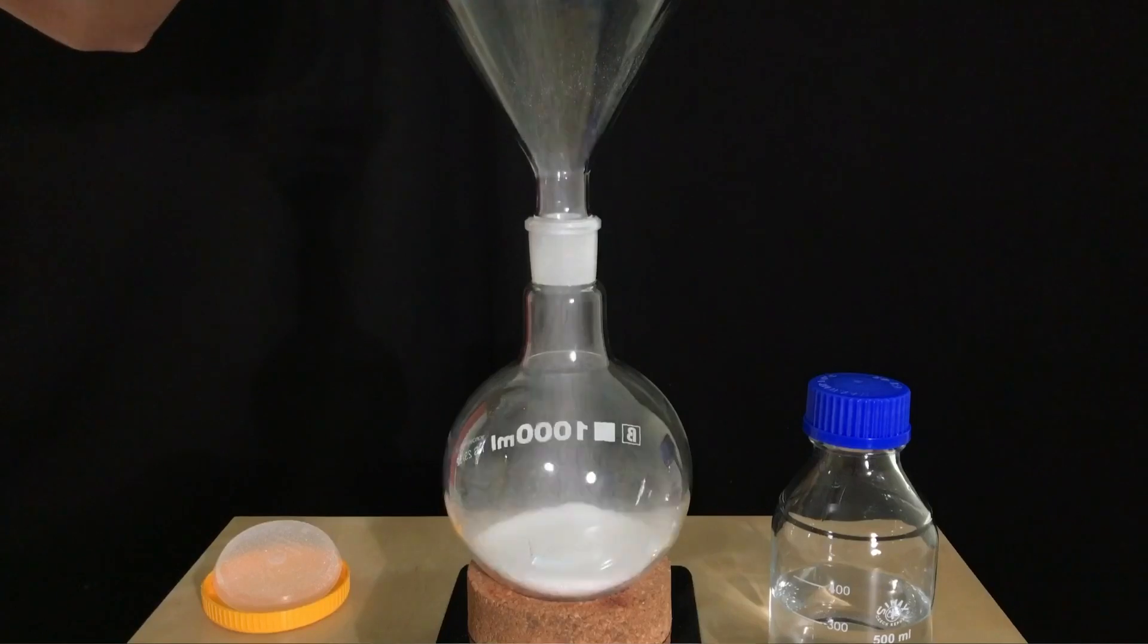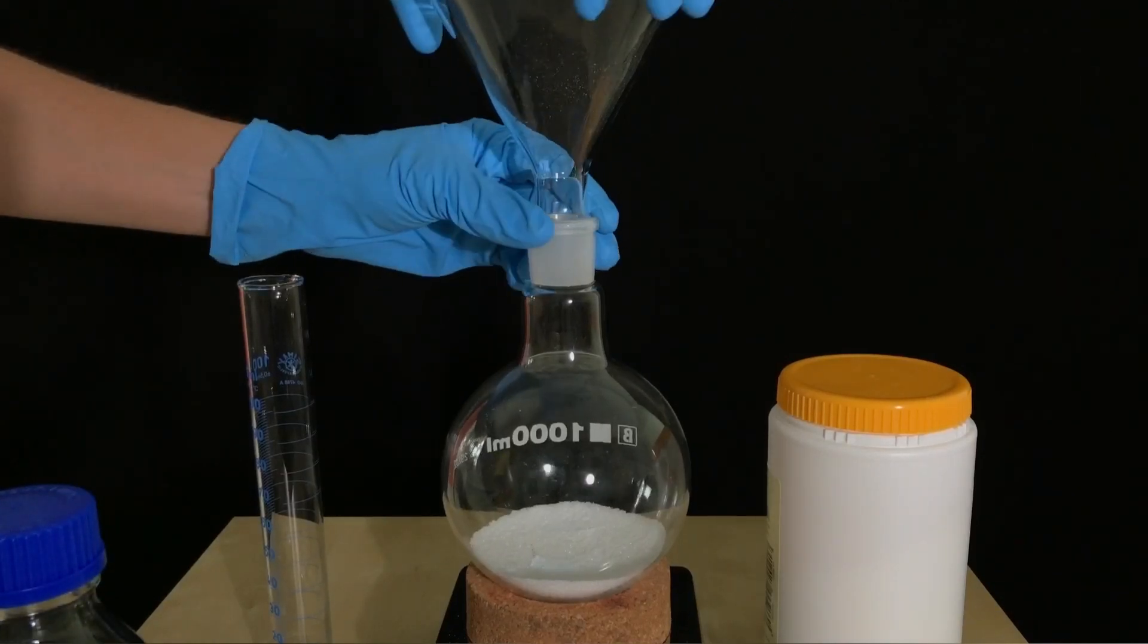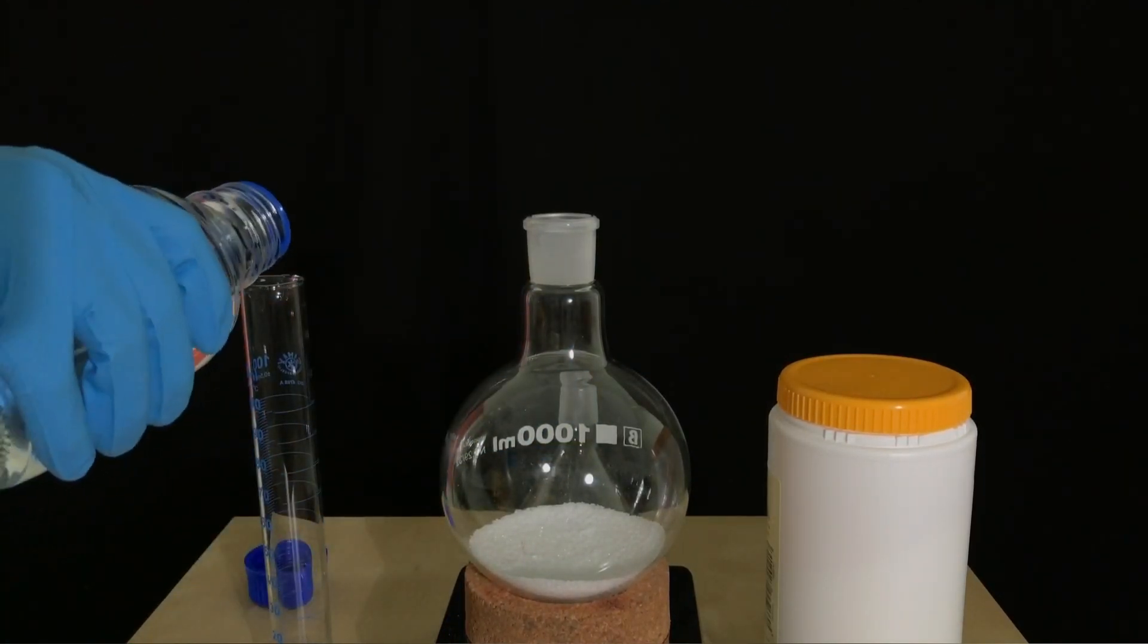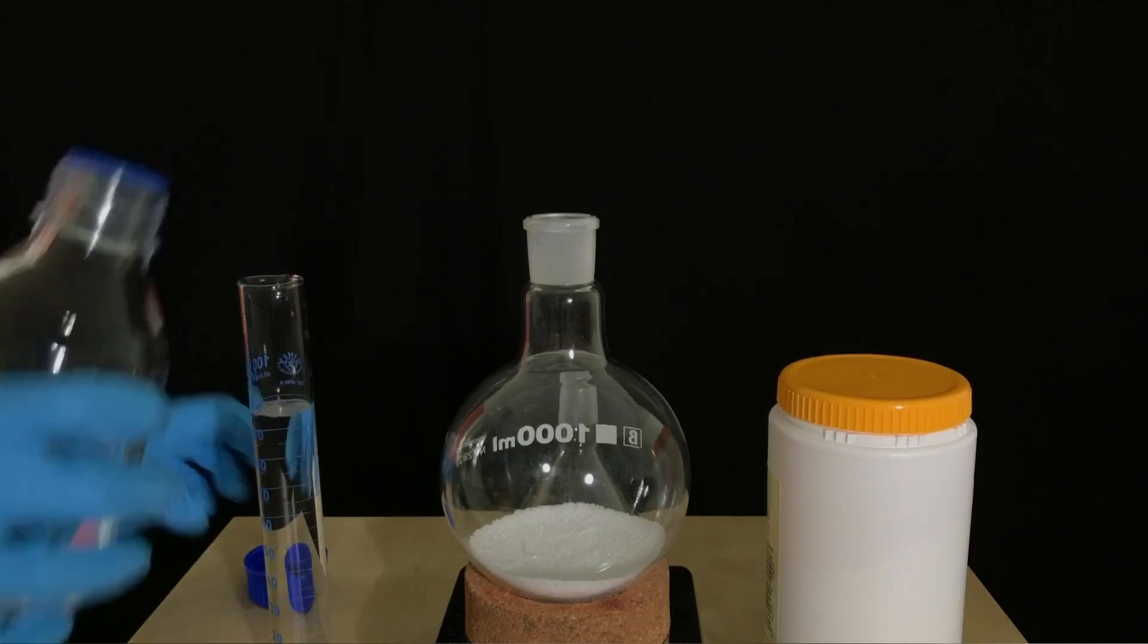The 97.1 grams of sulfamic acid we added to a round bottom flask containing a stir fish. In theory, only 40.5 milliliters of methanol would be needed to fully react with the sulfamic acid. In reality this would give a poor yield, therefore excess methanol is used to act as a solvent.